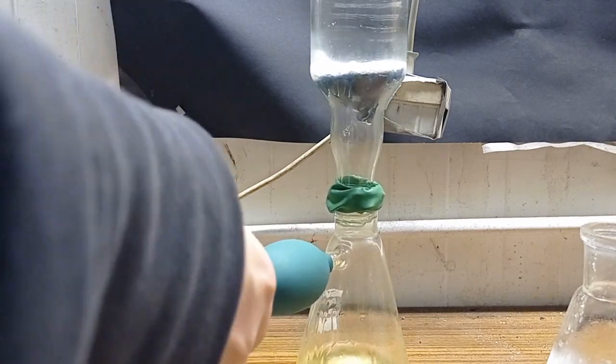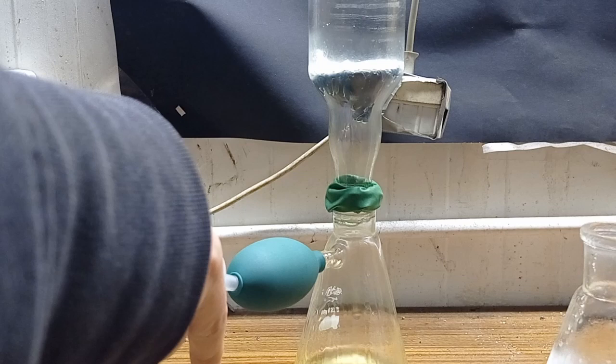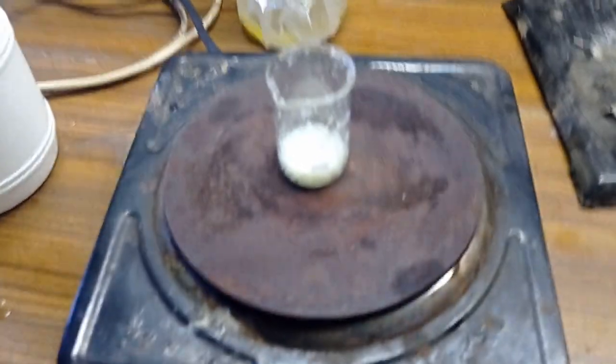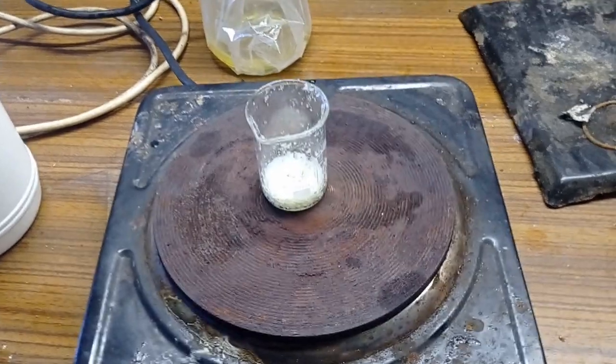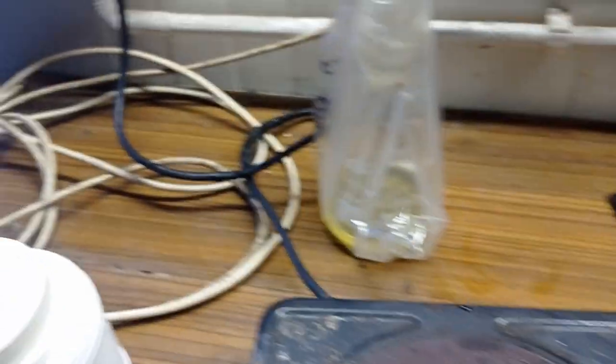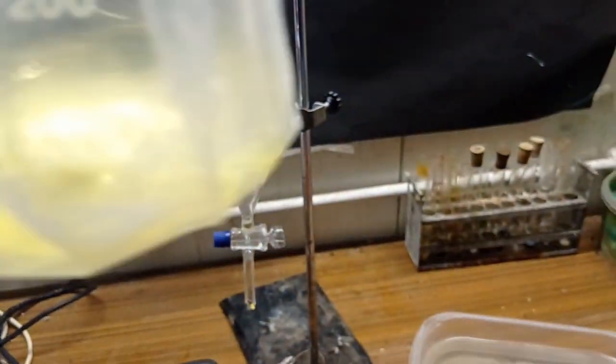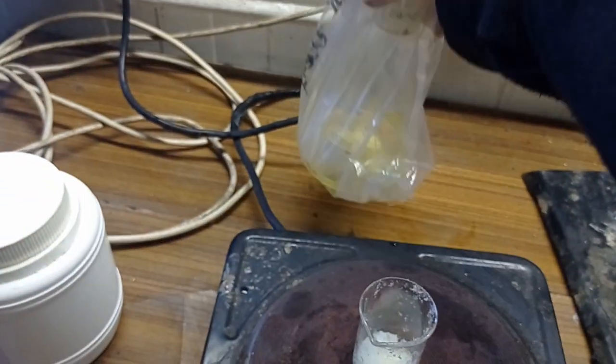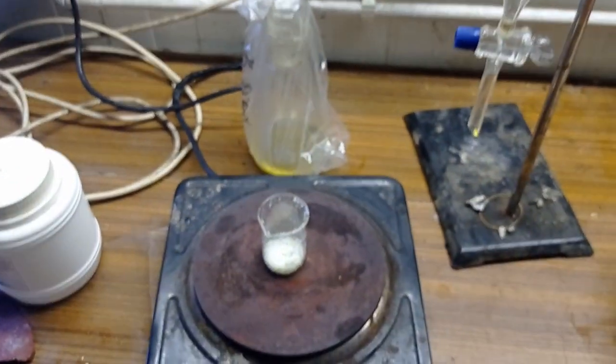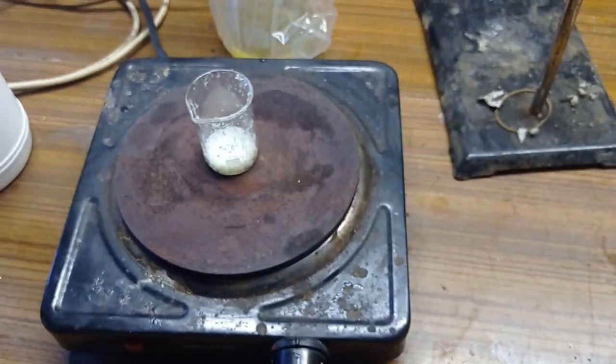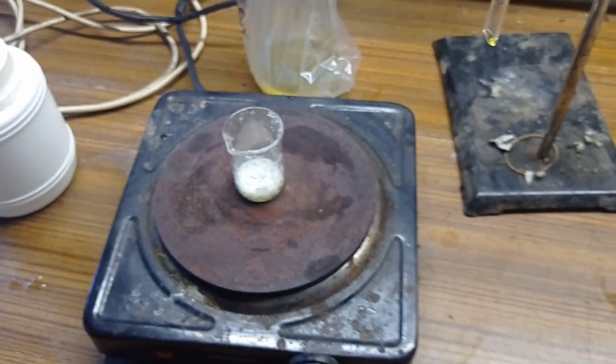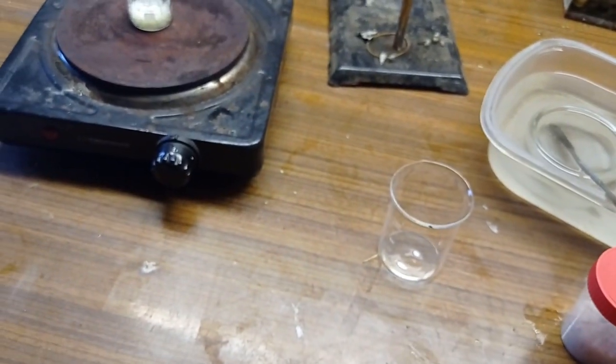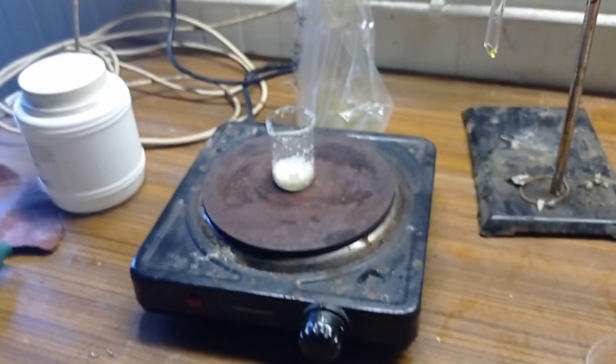Yeah, those crystals are para-nitrotoluene isomer. Okay, so that's everything I got from the second run of freezing. As the mixture, nothing crystallized out, so yeah that's everything, and now I will recrystallize it from ethanol.